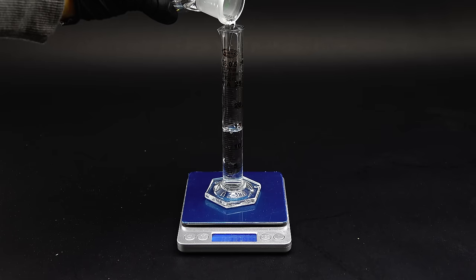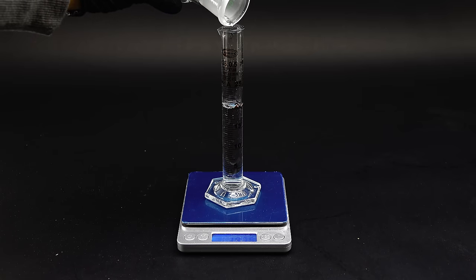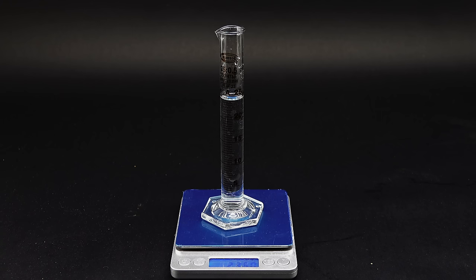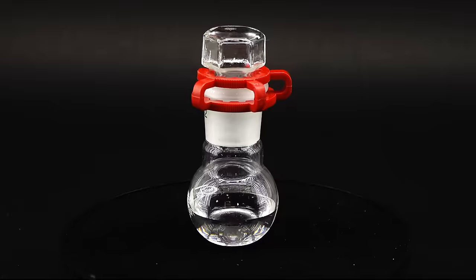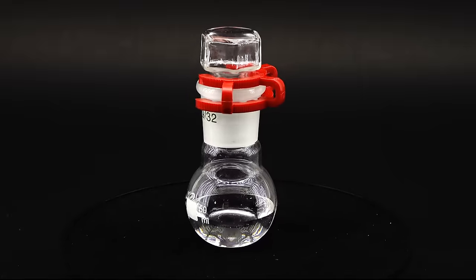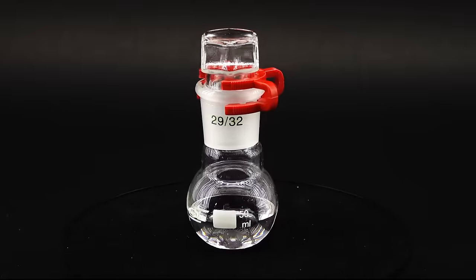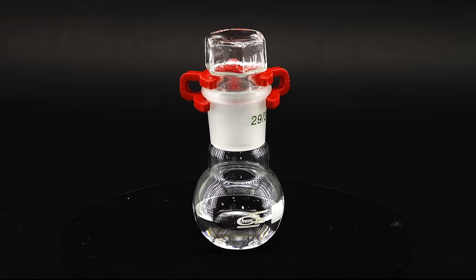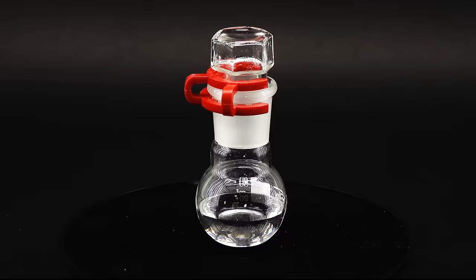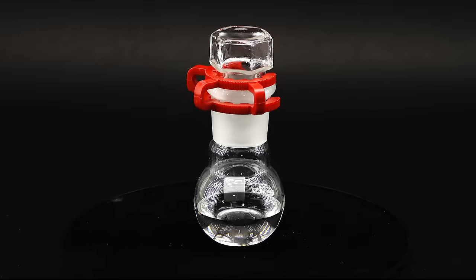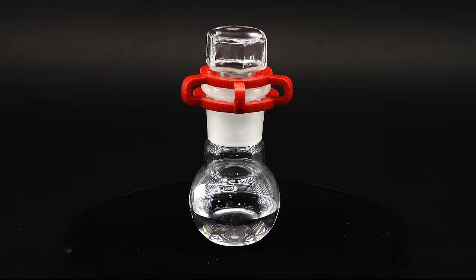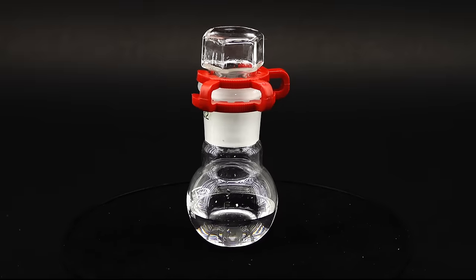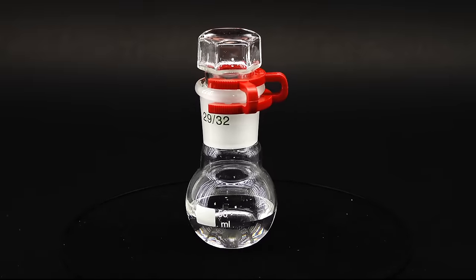Anyway, with the residual hydrazine neutralized, it's now time to measure the yield of this whole endeavor, and it turns out that I managed to make 24 milliliters or 23.6 grams of some diluted hydrazine hydrate. Hydrazine's concentration in this solution should be about 10% based on the hydrazine sulfate used to make it, which isn't much, but makes it tame enough to work with reasonably safely. In theory, I could try concentrating my hydrazine further to really ramp up its reactivity, but I decided against it for this project because I feel that I have potentially exposed myself to enough toxic gases already.